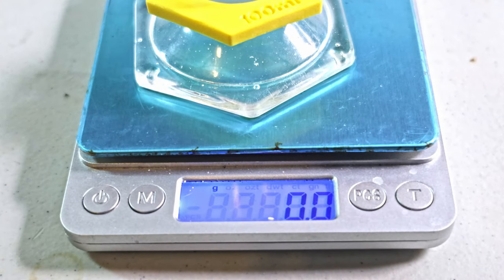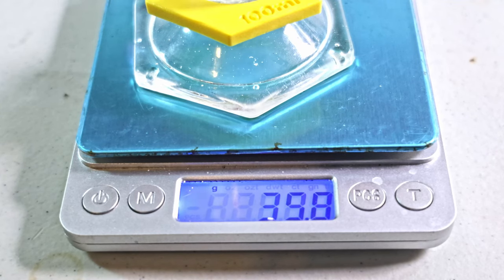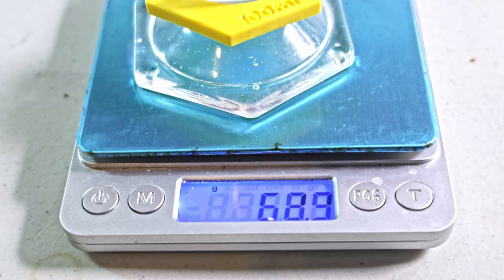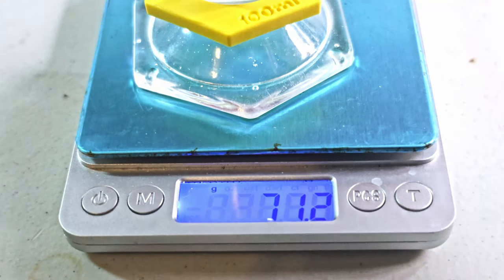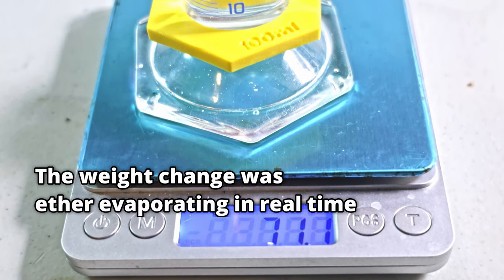To check the purity, I am going to weigh out 100ml of my ether. According to literature, the density of diethyl ether is 0.713g per milliliter. Our 71.2g means we have made pure ether.